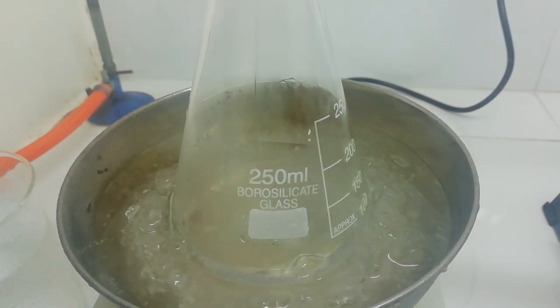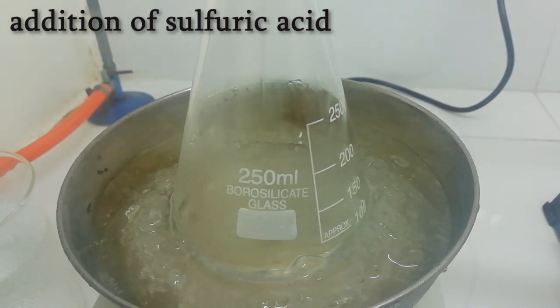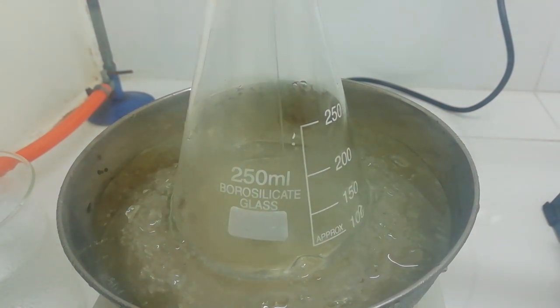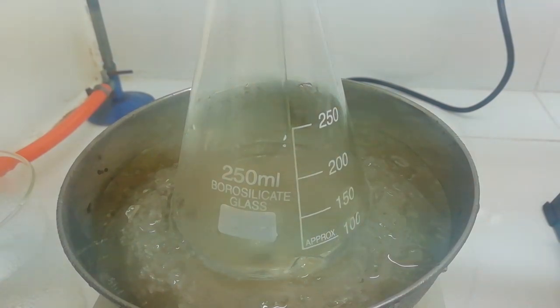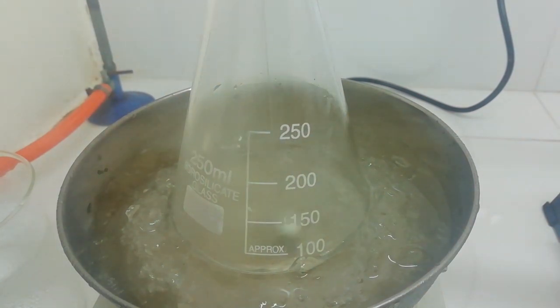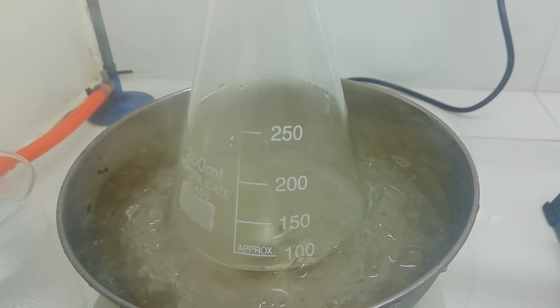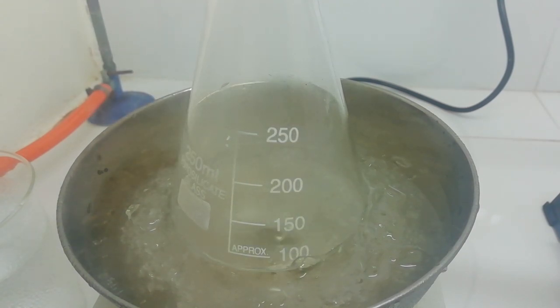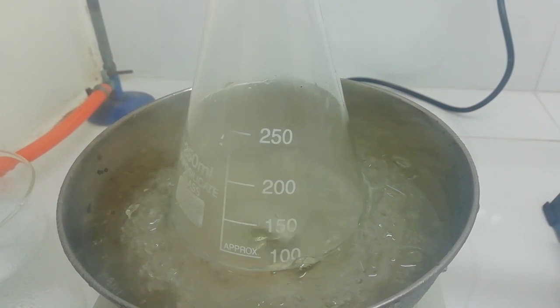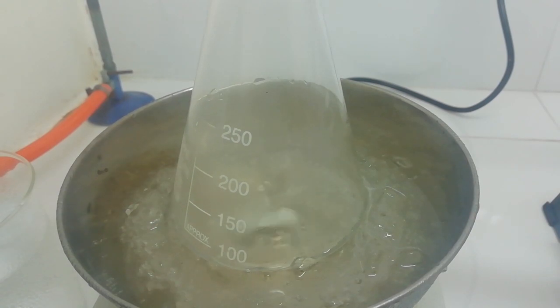Because this concentrated acid mixing process is very exothermic, it will produce a lot of heat. Now I just added all the sulfuric acid and I am going to distill this product. I am going to remove the ice bath and heat the flask.